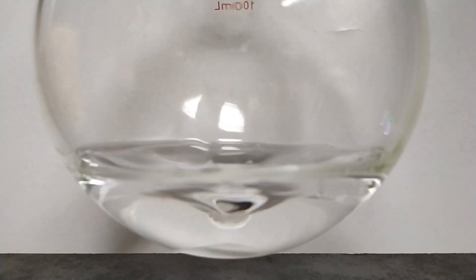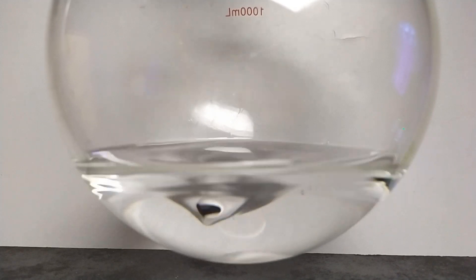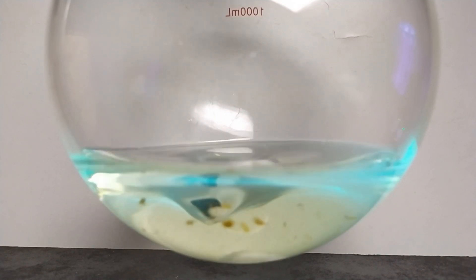After the acidic solution is prepared, we need to add harmala to it. At this point I turned on a black light to be able to see how it glows under UV — to be honest, this is mesmerizing. At this point it is not necessary to heat up the solution, as all hydrochloride salts are very soluble in water.